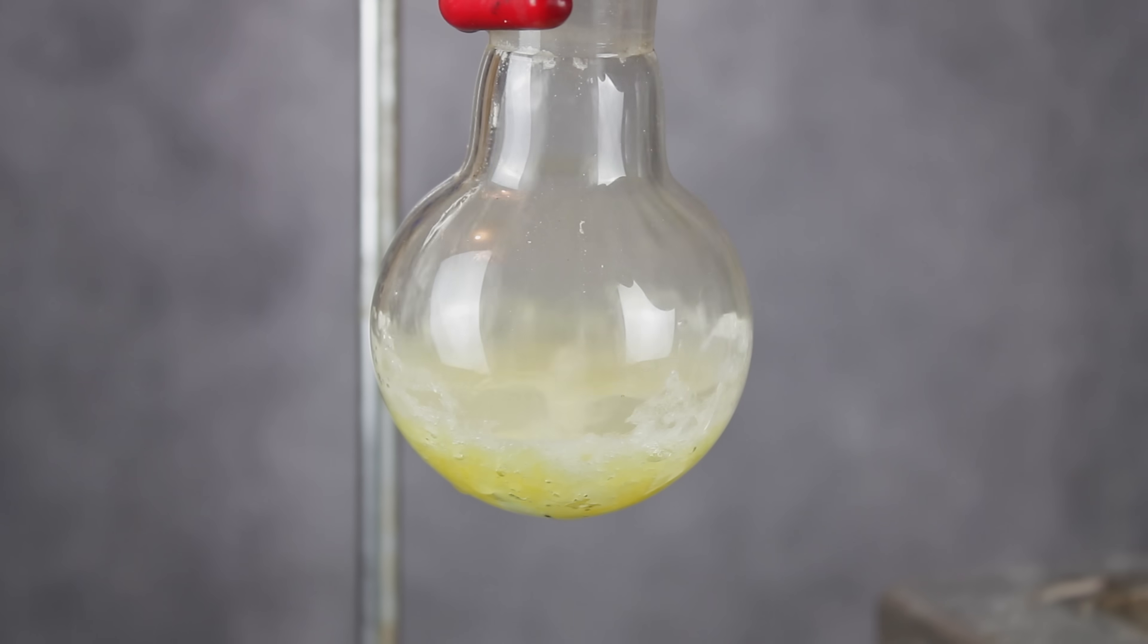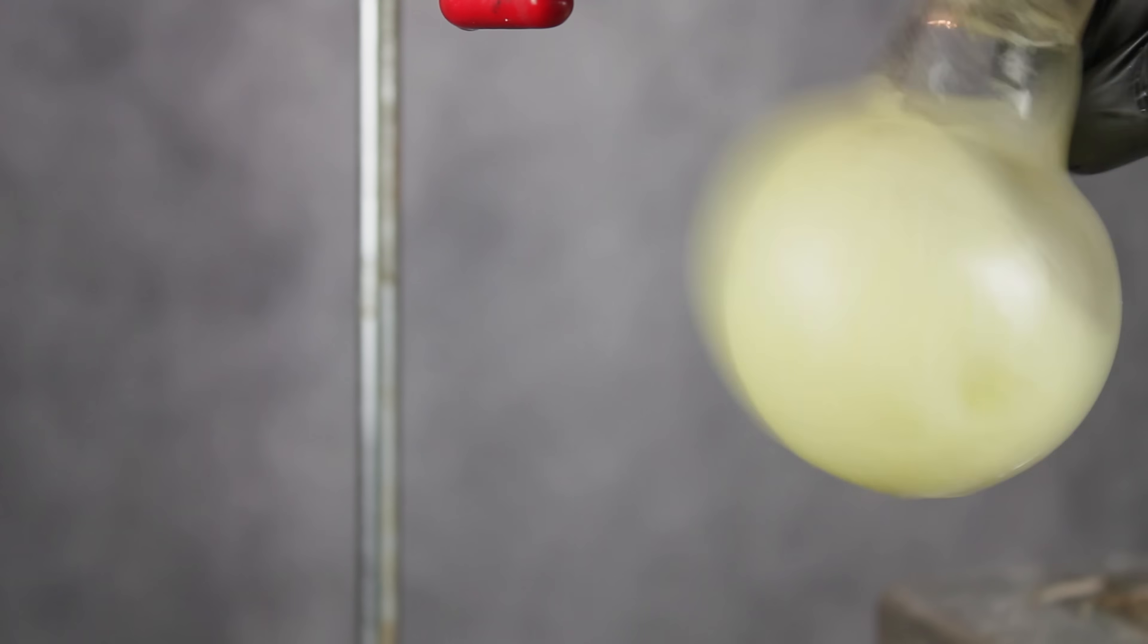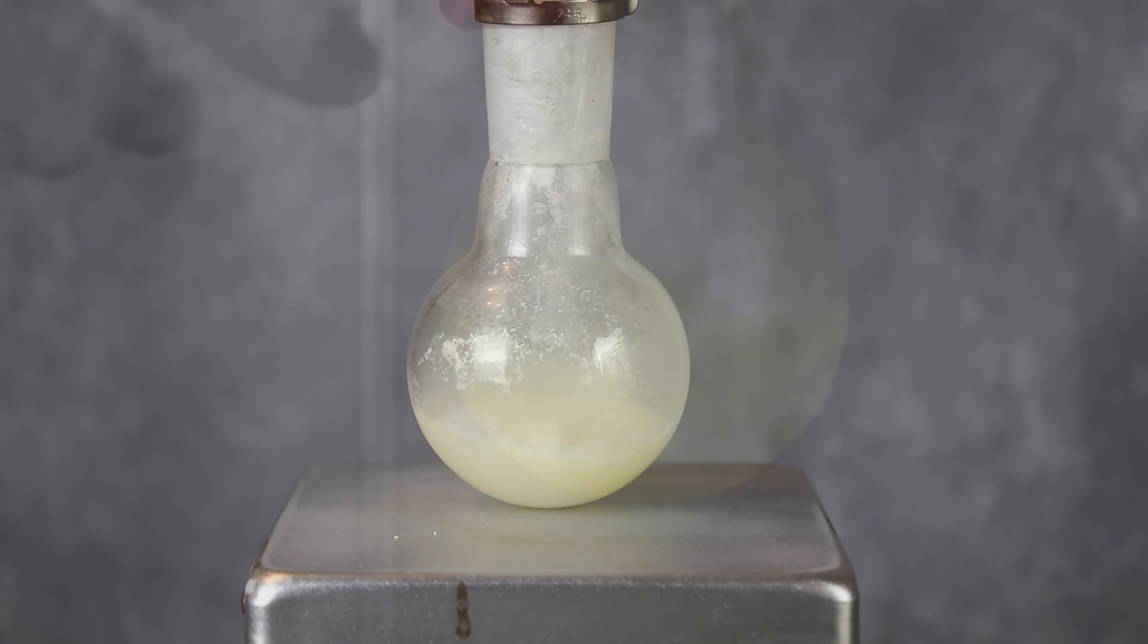This was washed with two 25 milliliter portions of diethyl ether to remove any leftover impurities. And with that, it was finally time to make some nikethamide.